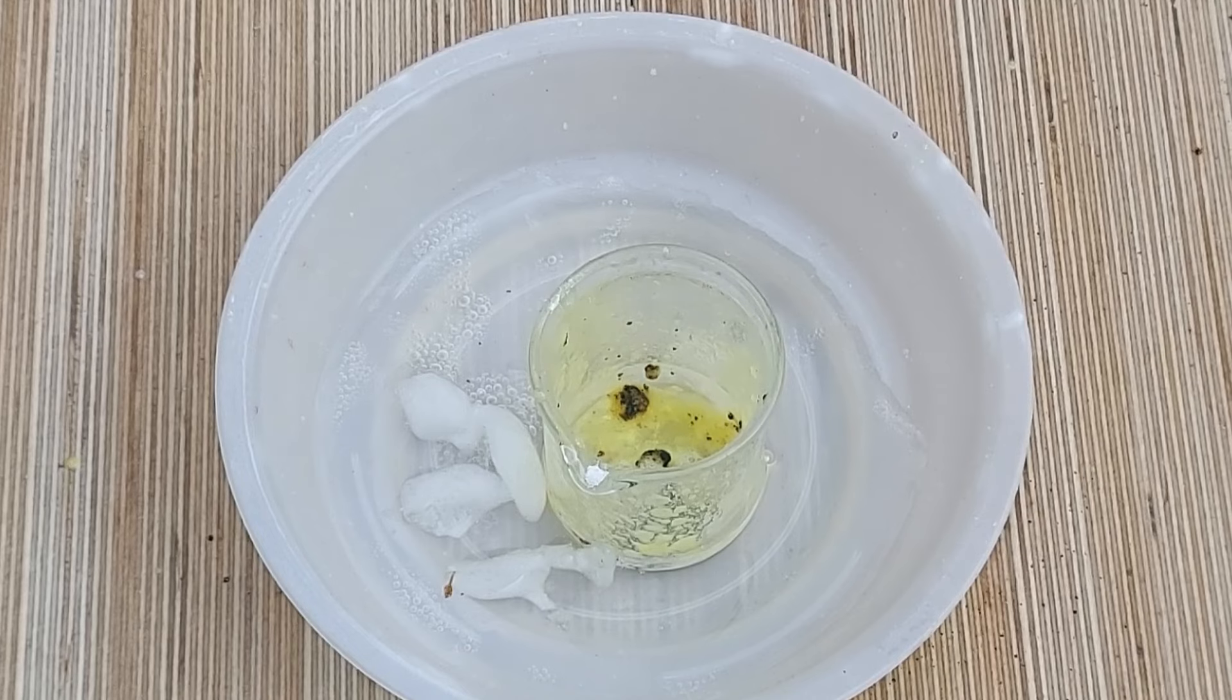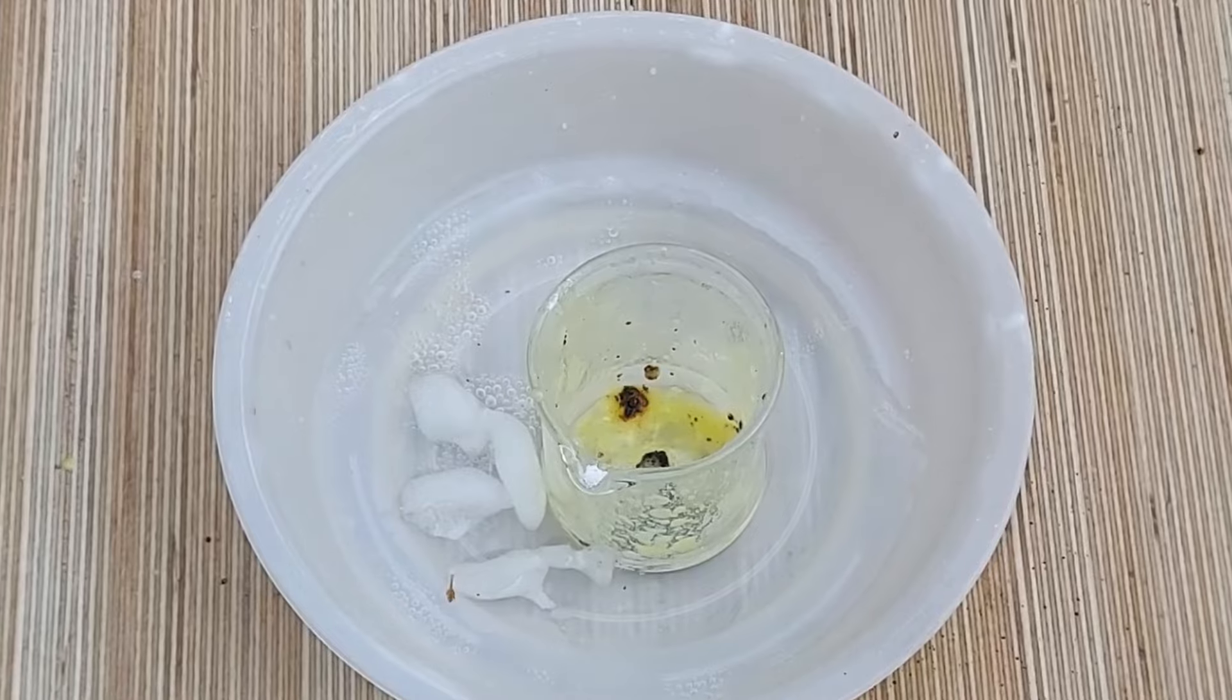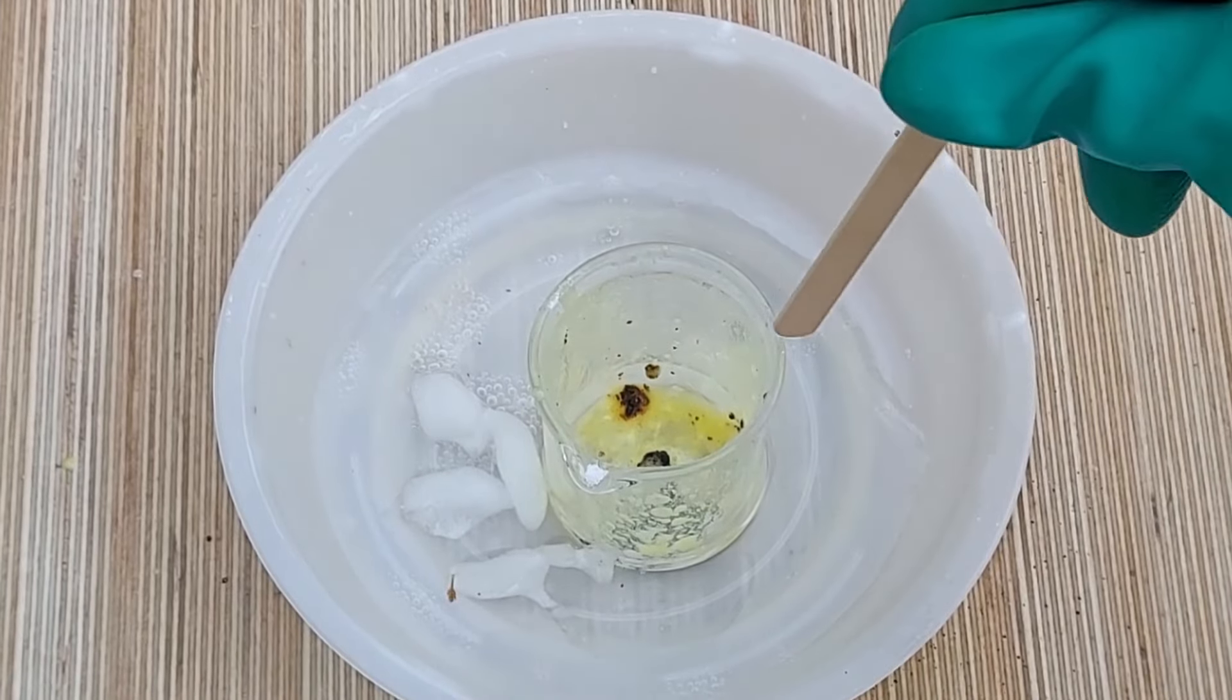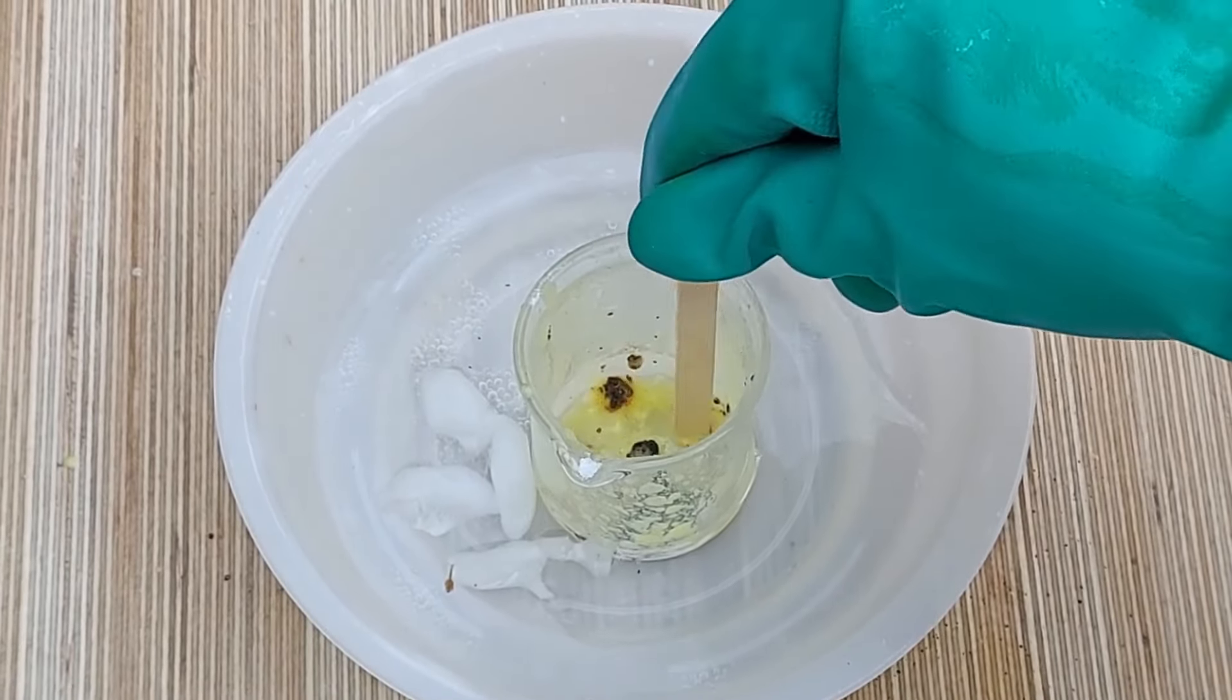Chloric acid, man, you can't beat it. We're going to move on now to a slightly larger experiment. Before we do that, I happen to have a popsicle stick here. Let's just see what it does to the wood. Let's take a look at this wood - definitely burnt.